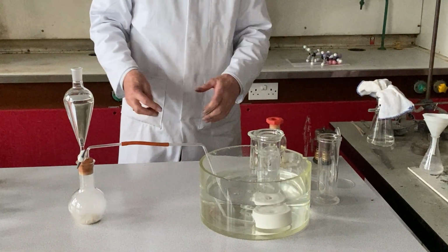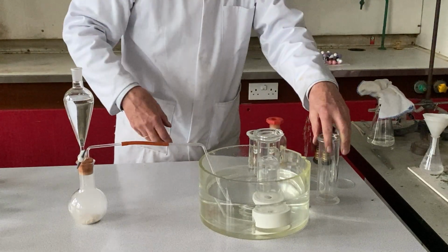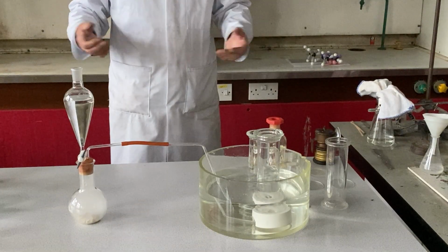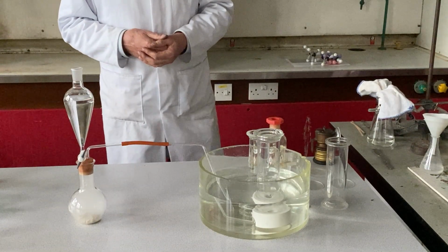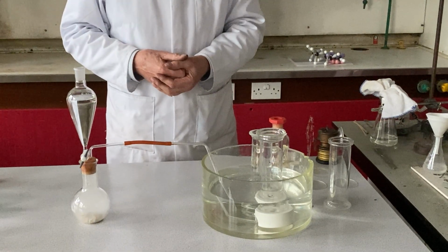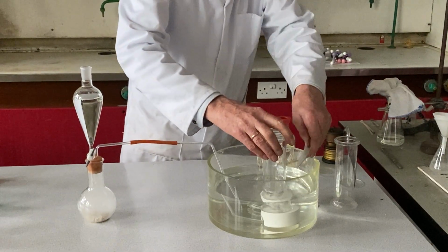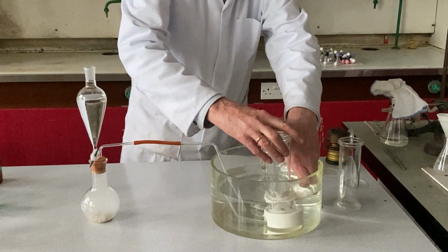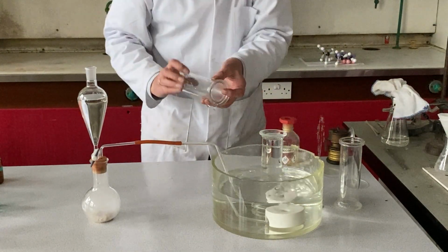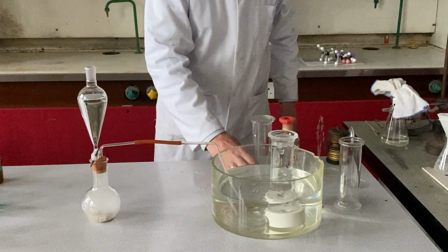This is called a pneumatic trough. This method was first invented by the English chemist Stephen Hales in 1722 and subsequently brought to great world usage by the great English chemist Joseph Priestley in the 1770s. So you see we're now almost full, and our acetylene, of course, is not soluble in water, so I've got a jar full here. I'm now going to collect more acetylene into a second jar.